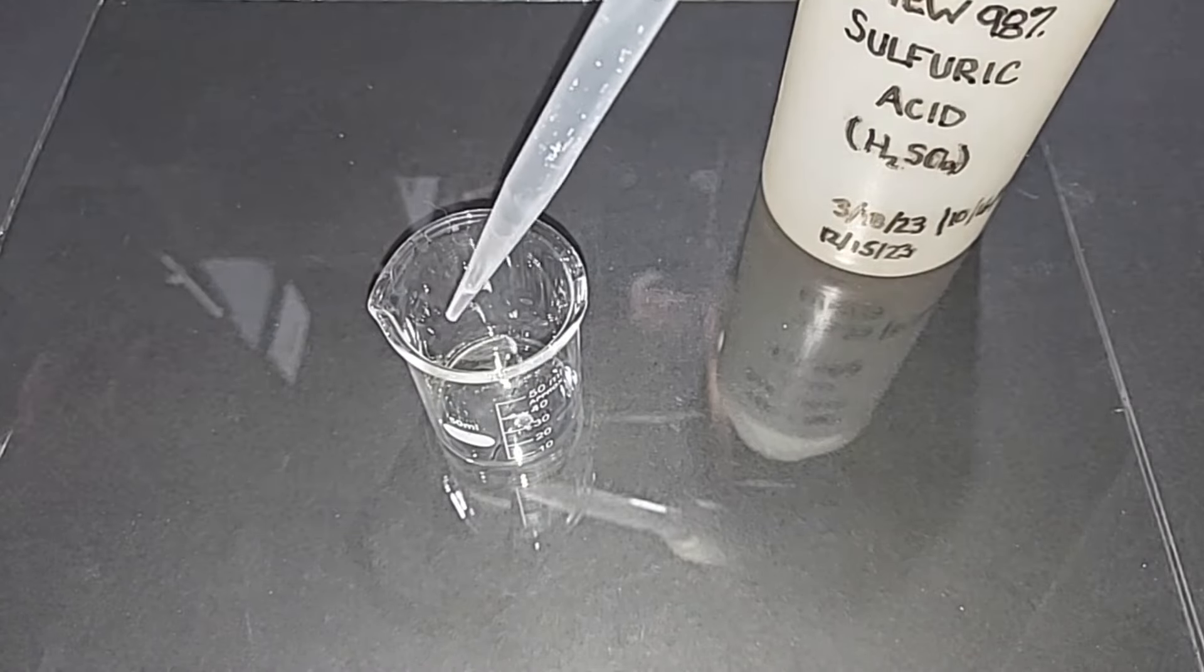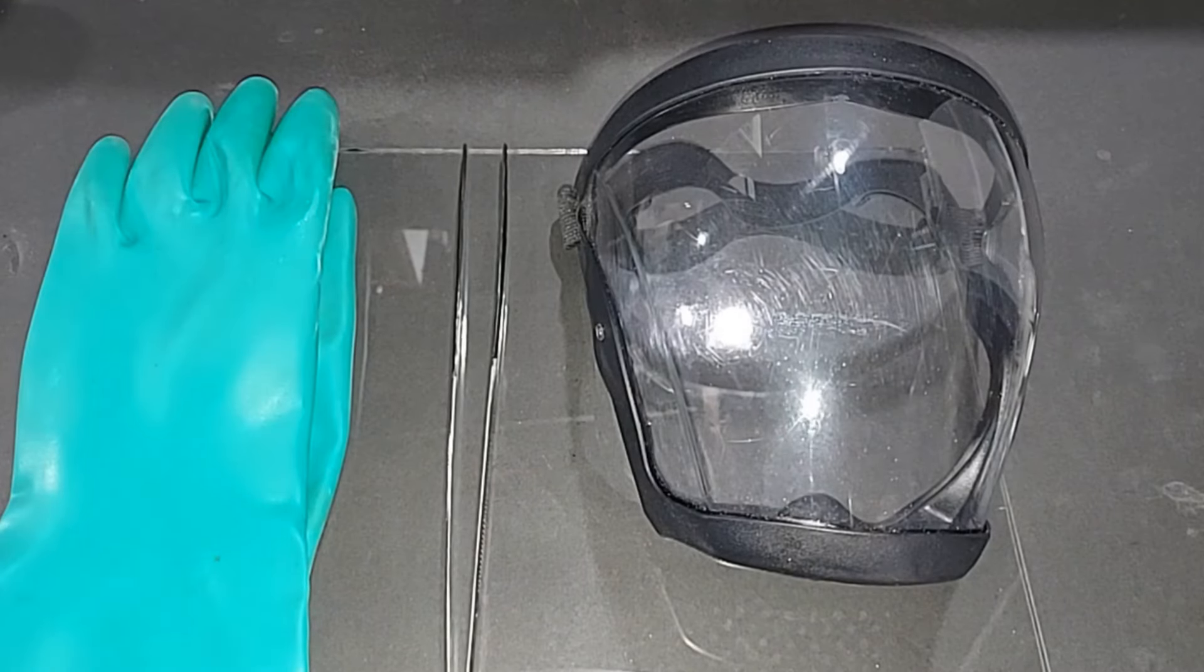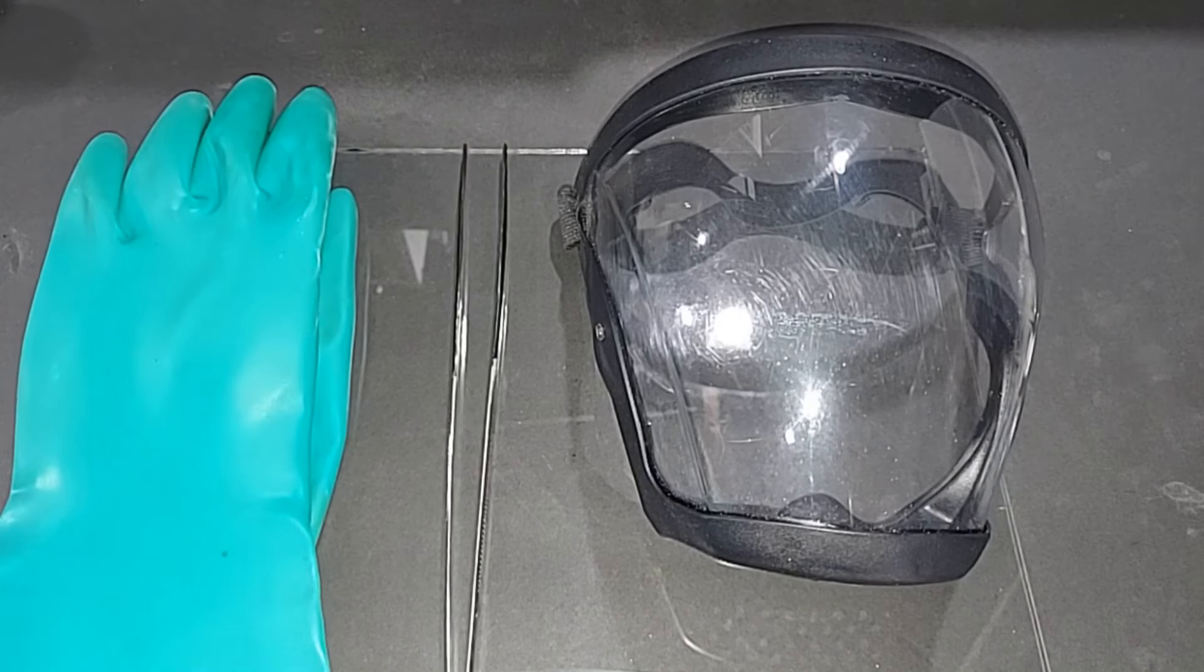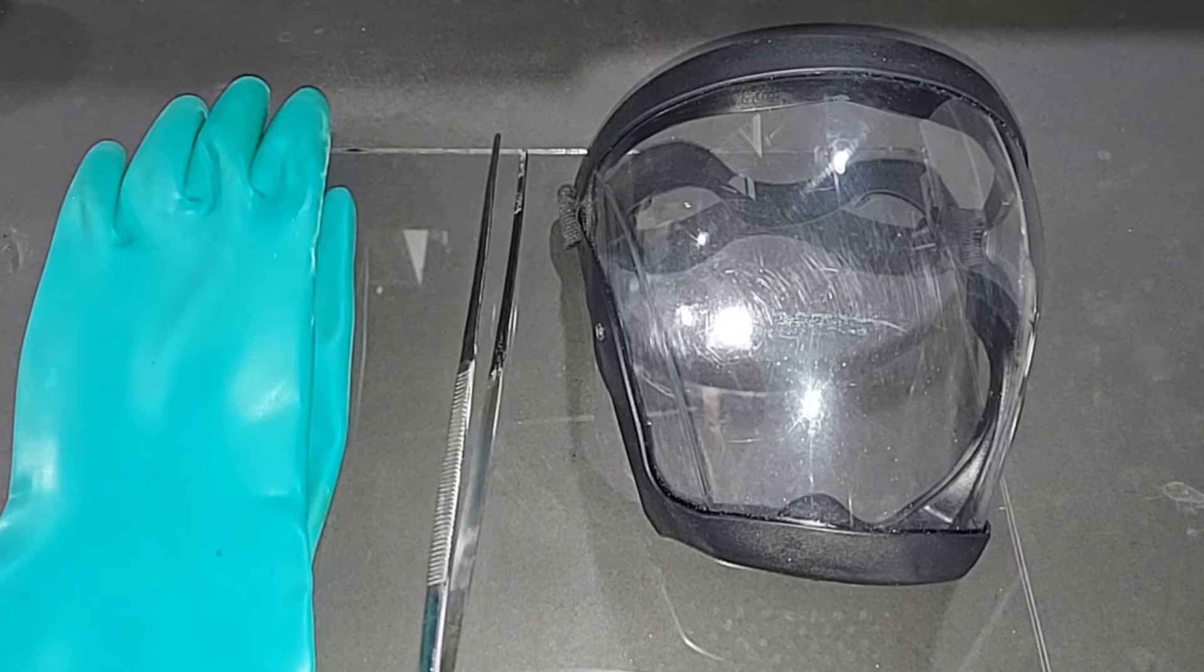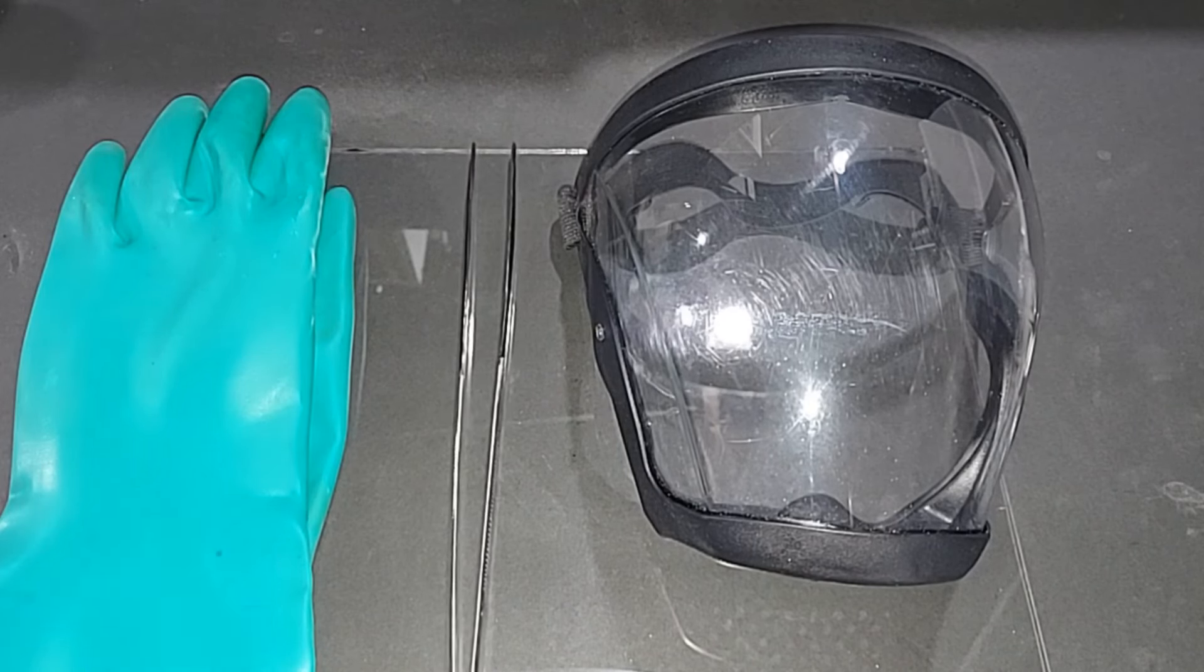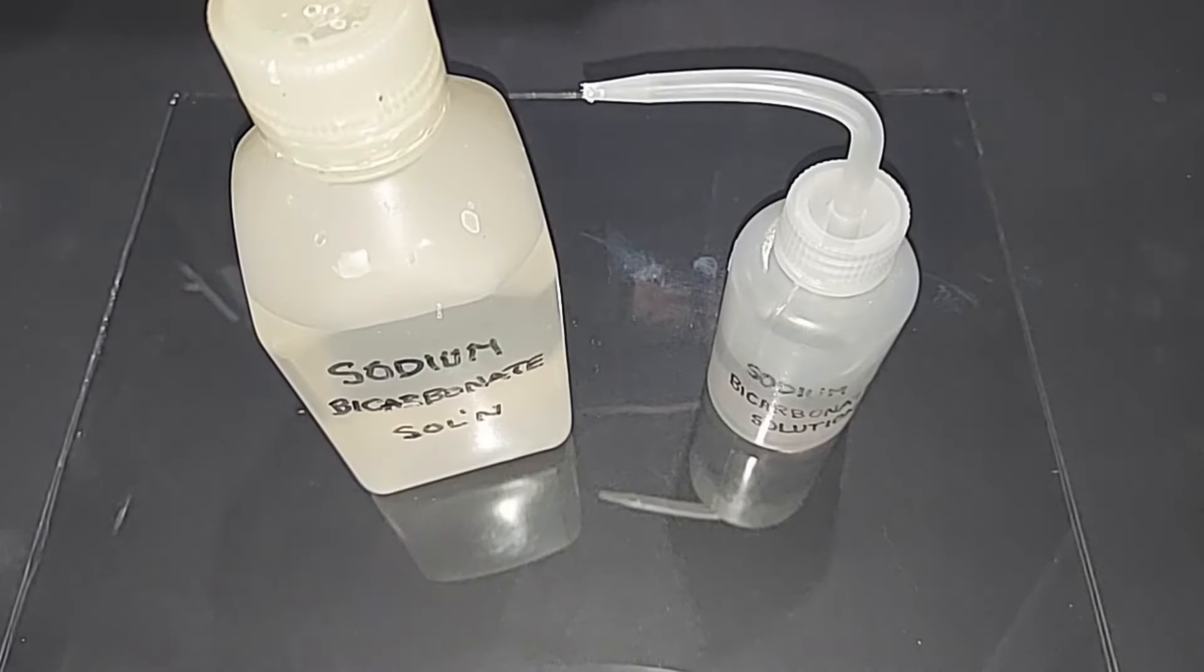These are just a few of the things I'll be using for this chloric acid experiment. I have a very good pair of chemically resistant gloves, a long pair of tweezers to drop different items into the chloric acid, a polycarbonate face shield, and also a full gas mask and full-length chemically resistant apron. You just cannot be too careful when doing this experiment.